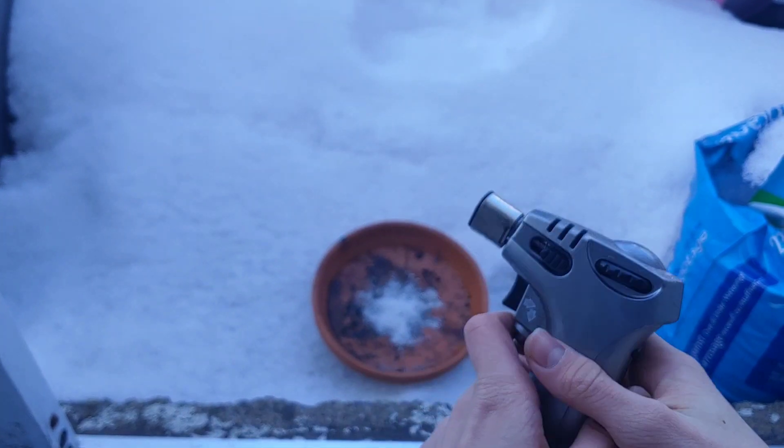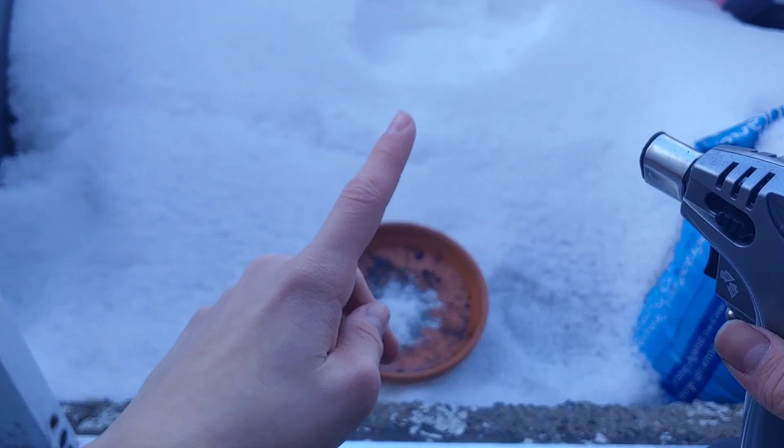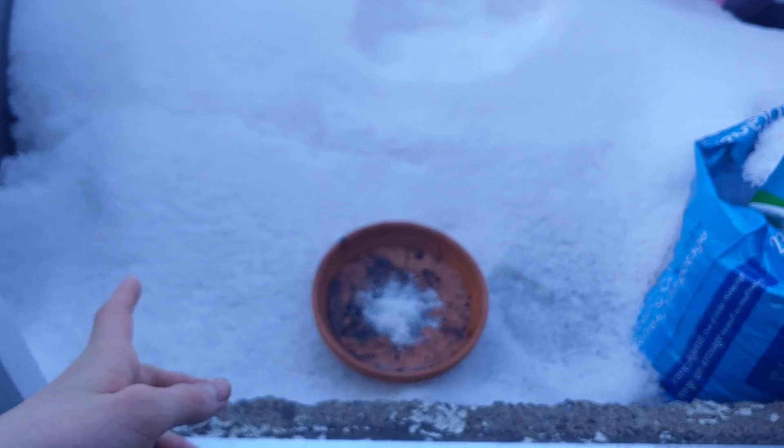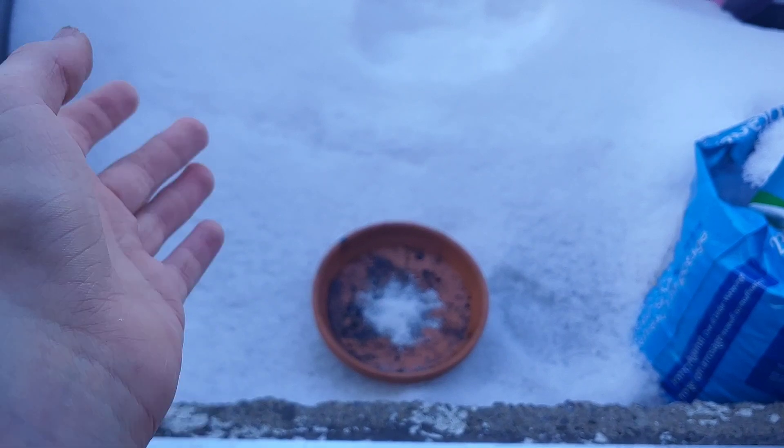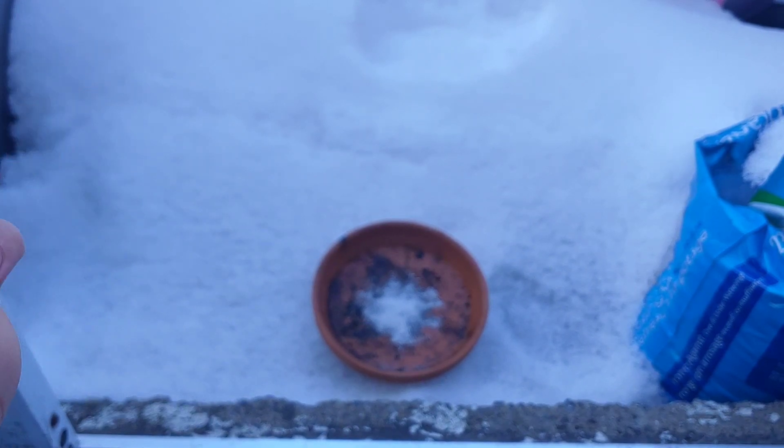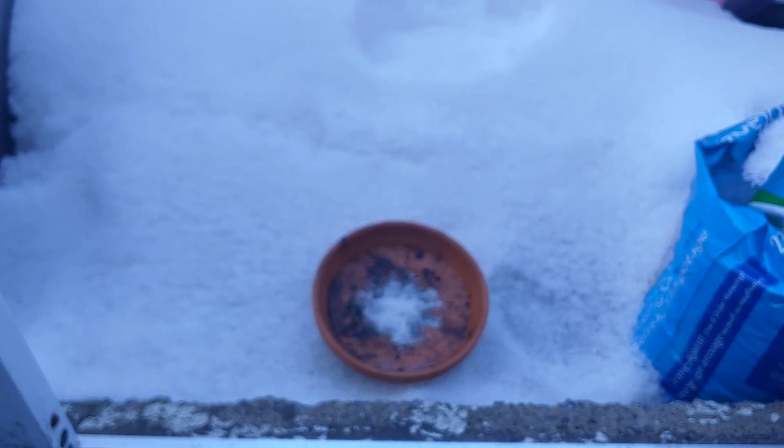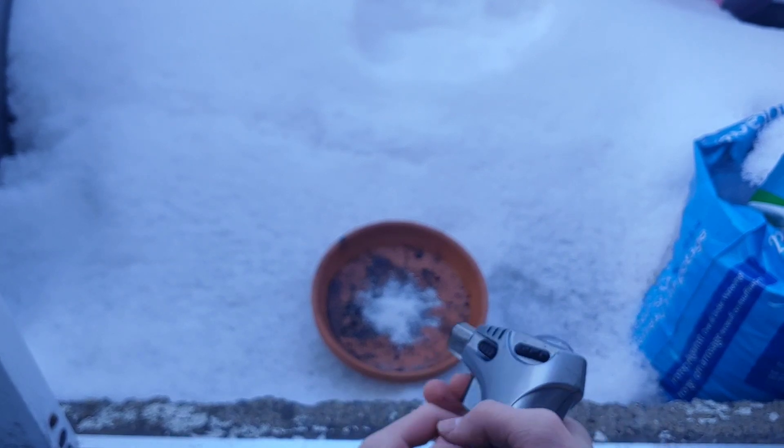Okay, so we're gonna be burning the chlorate now. We have to be careful, though. This stuff burns really hot. I mean, I melted some lead that was next to it. Don't ask why there was lead next to it in the first attempt. Whatever. Let's just do it, right? Needless to say, don't do this at home. It's really dumb and dangerous.